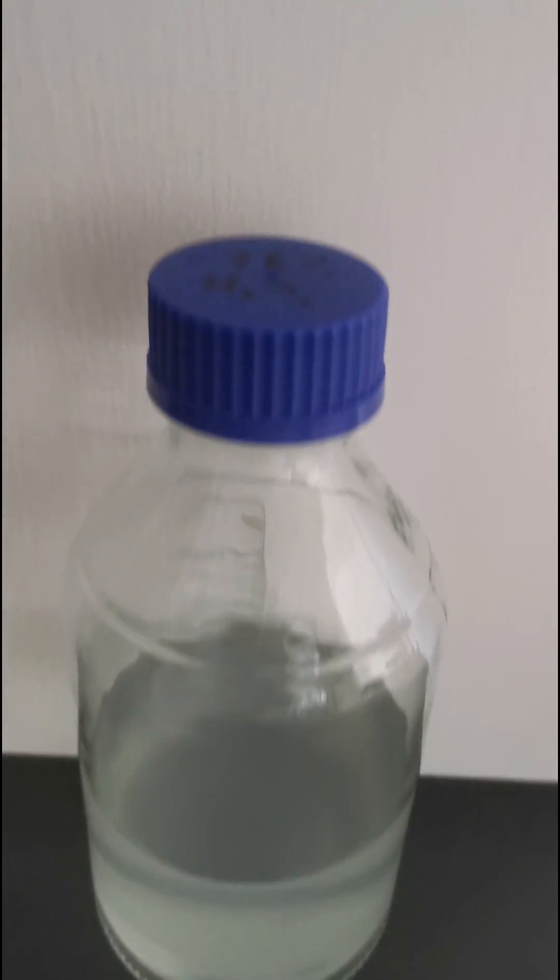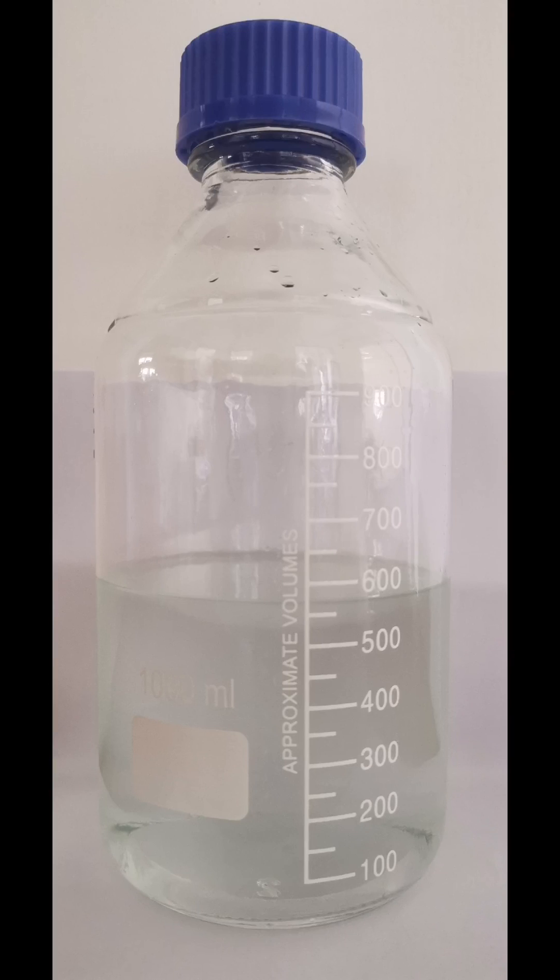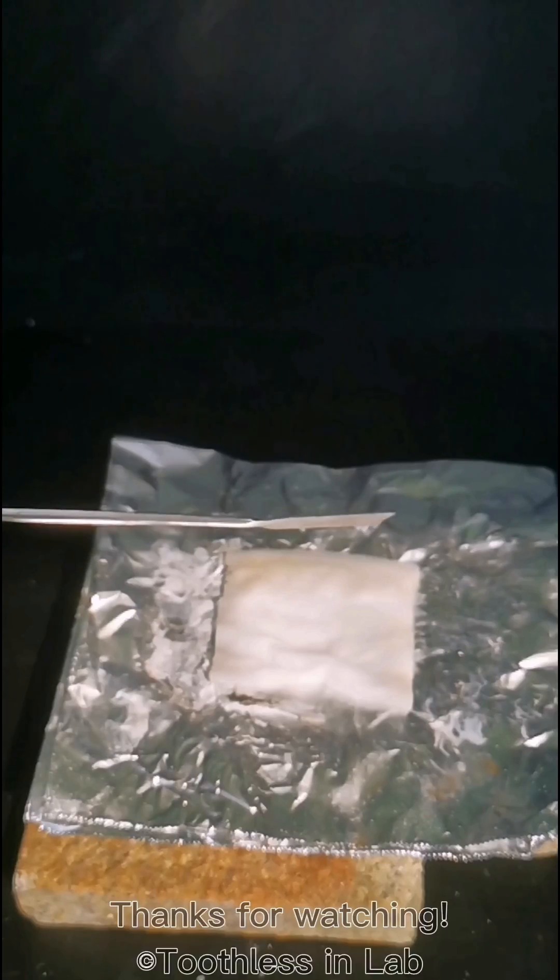This is the final product. But there are still some Vaseline left in the liquid that I cannot separate. Then I mixed it with sodium borohydride. Have fun in slow-mo.